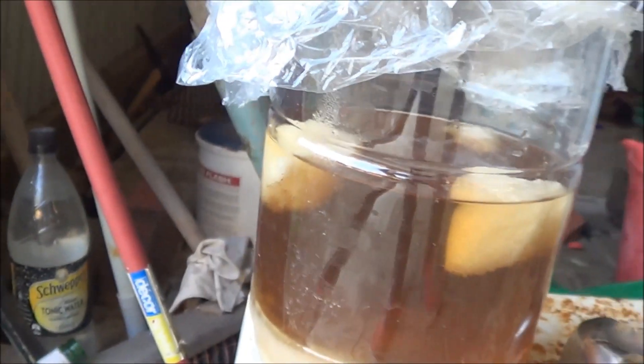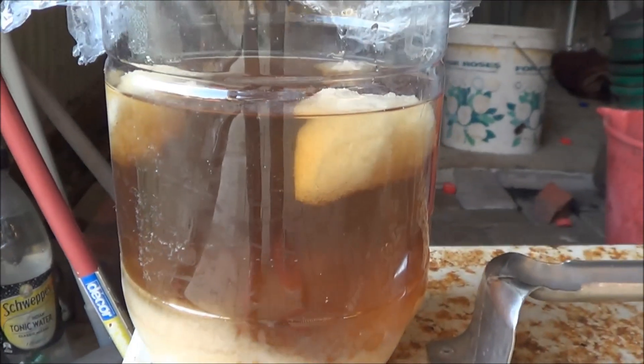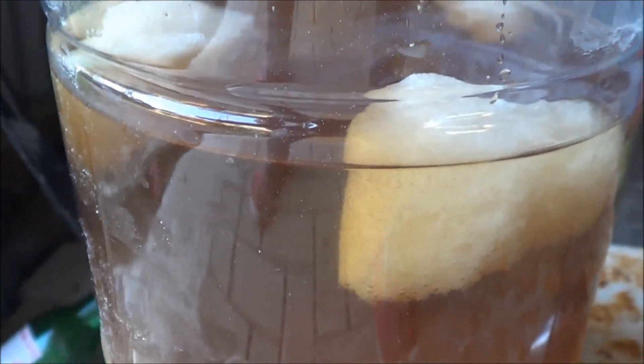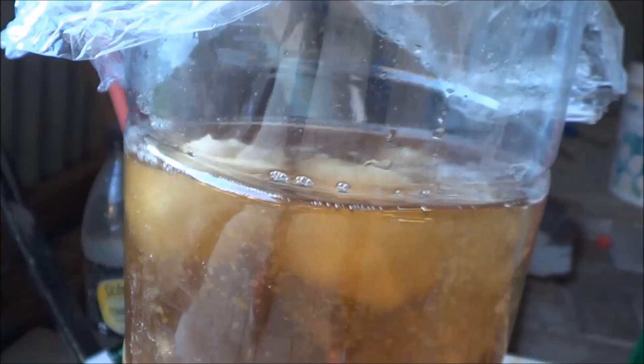I haven't really seen this before during crystallization, but it appears it's crystallizing near the surface, in some weird ice cube blocks. I suspect this has something to do with the amount of gas that's still being very slowly put off, got trapped inside the crystals as they formed, and made the lump start floating, and then the crystals have collected around it, but still, if I move this, it'll probably, yeah, that's what I thought.